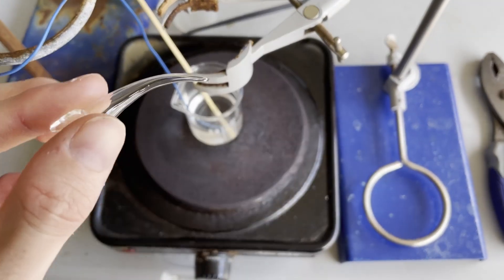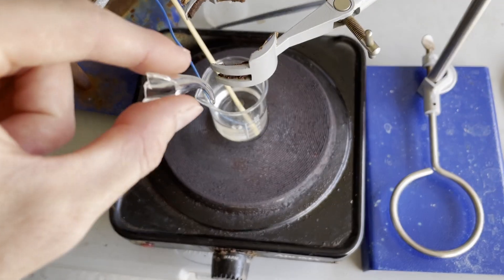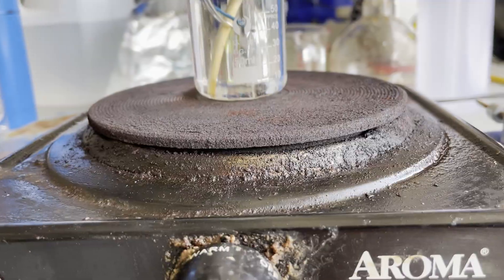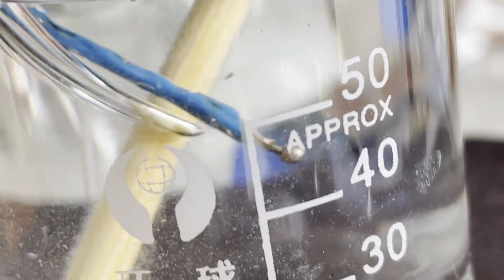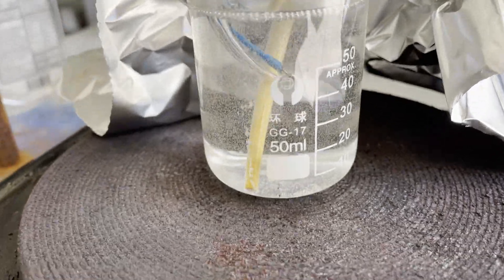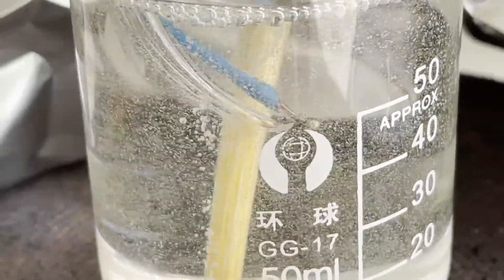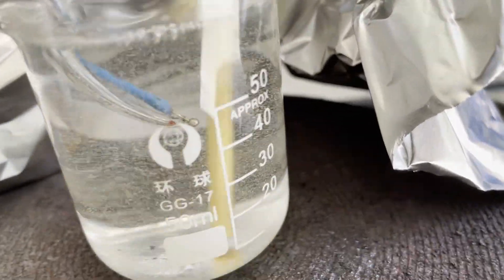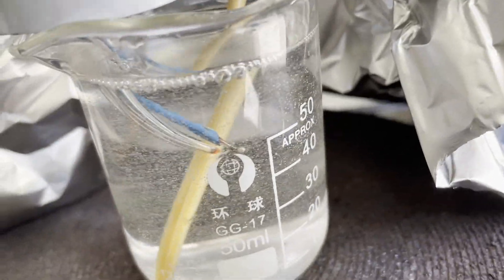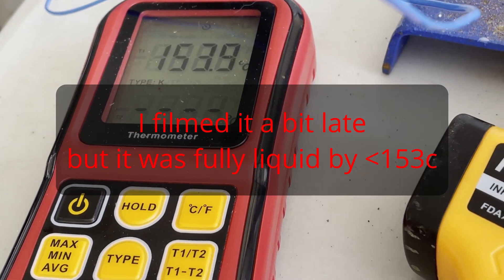All I had to do was make something like a capillary tube out of a test tube, then suspend it over mineral oil heated up on my oldest piece of chemistry apparatus — the good ol' hot plate. From here I have to manually stir it, but I should get a pretty accurate reading. Besides the slight hiccup of my stir rod bubbling profusely, I actually got a fairly accurate reading, and it confirmed my beliefs that we do have the product. The melting point in the paper was 150 degrees Celsius, and the melting point I got was between 150 and 153 degrees Celsius.